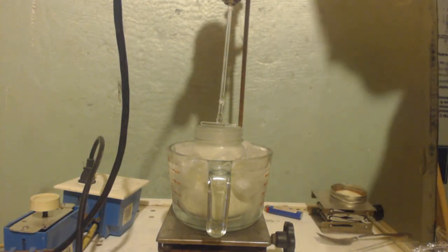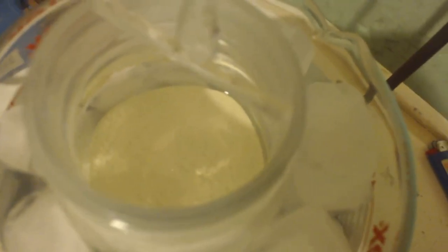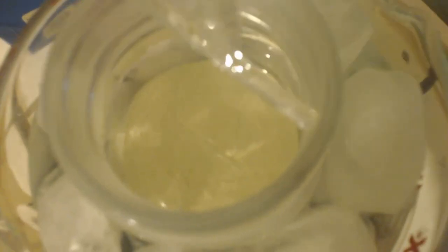This has been stirring for about 14 and a half hours. It's still yellow though. I mean, it's definitely turned white, but the last time I did this one, I didn't stir that much. I barely stirred at all and just left it overnight. It had all turned brown. At first it had turned white, like it's starting to do now. Half of it's white, half of it's yellow.